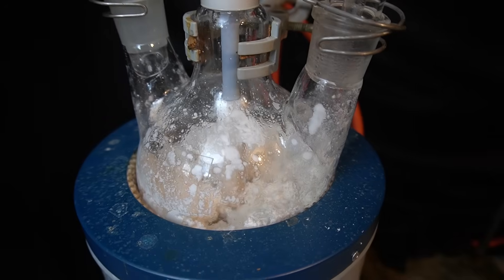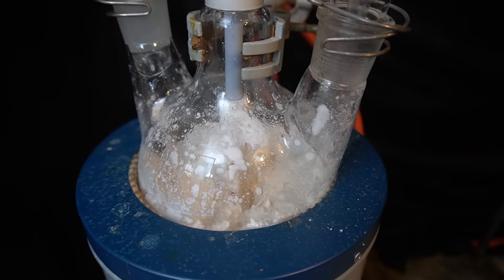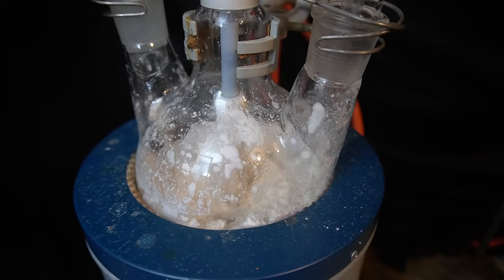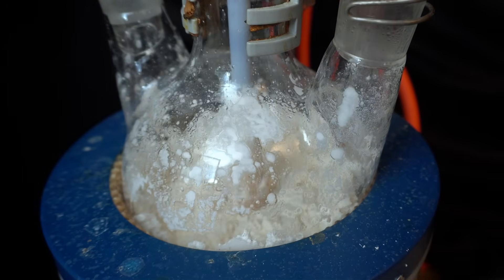Now I will add the last bits of acetyl chloride and then let this reflux to fully complete the reaction. And after that, we can separate the product by distillation.